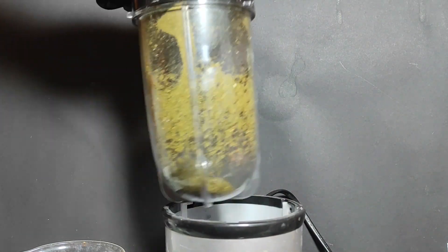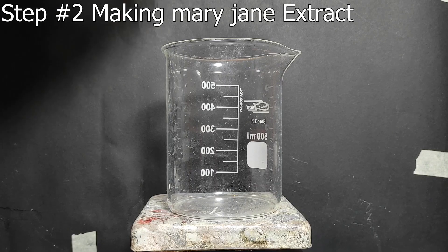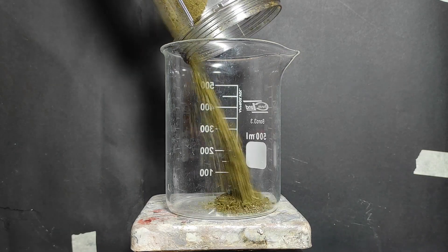After the w** has been shredded it became some kind of a w** paste. That's because it's f***** and there's a bunch of junk like oils and fats. Even though it's a w** can't f***** the plant. So the w** paste was in a beaker and now we're making a w** extract.